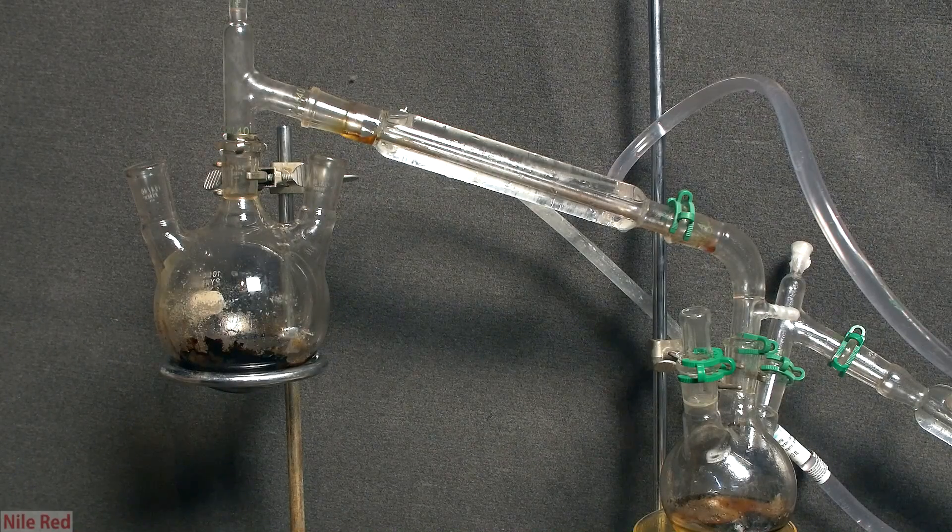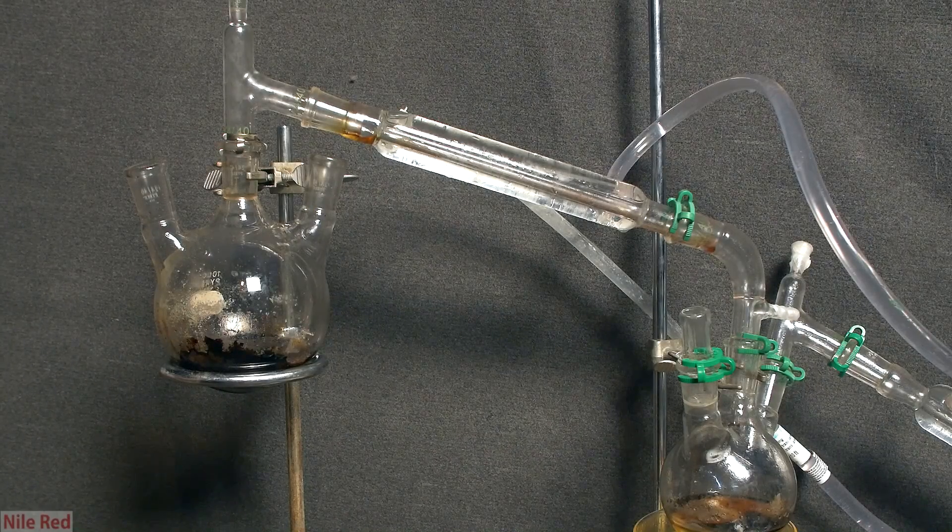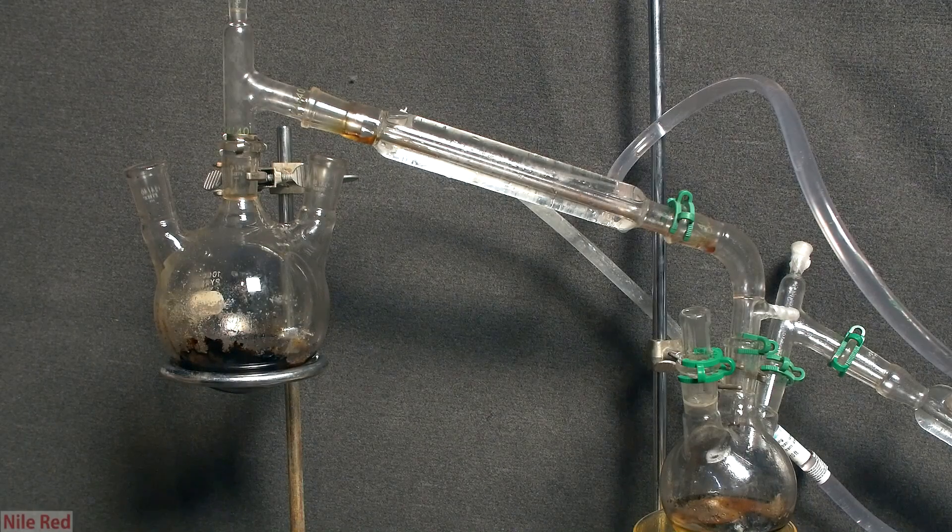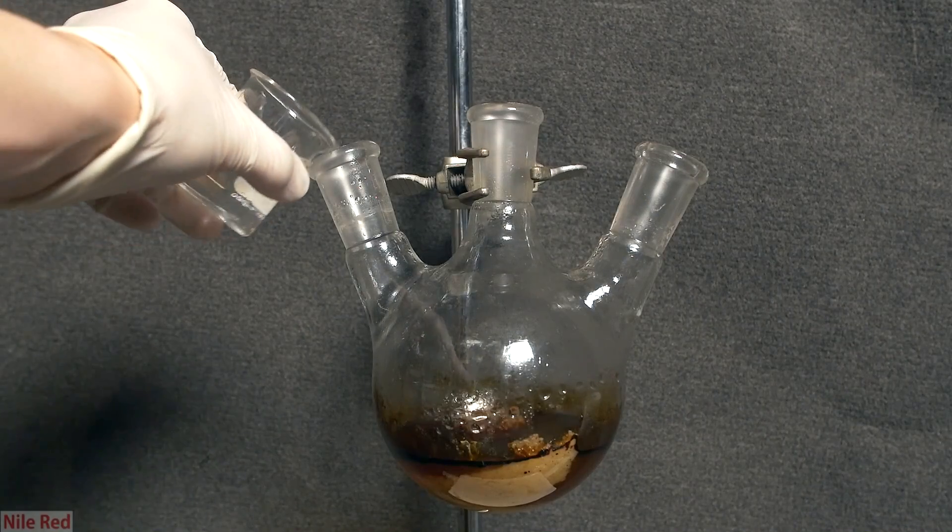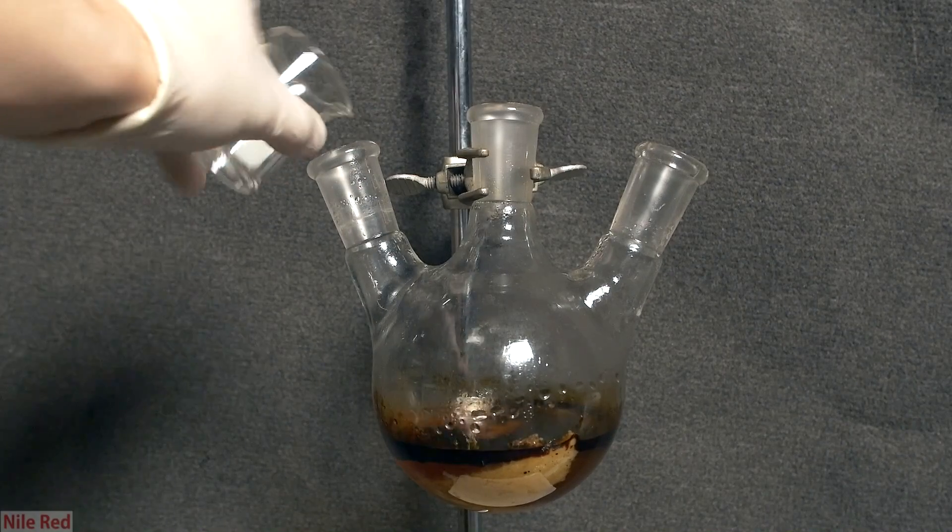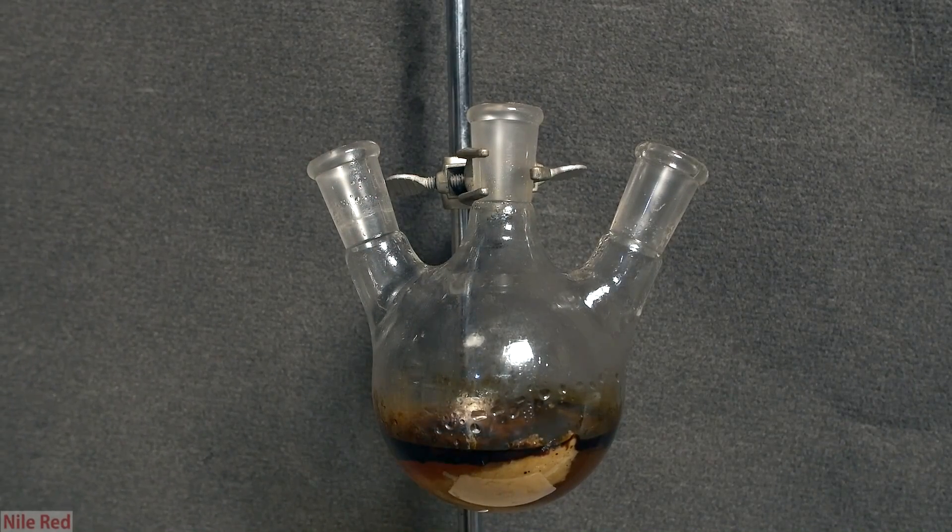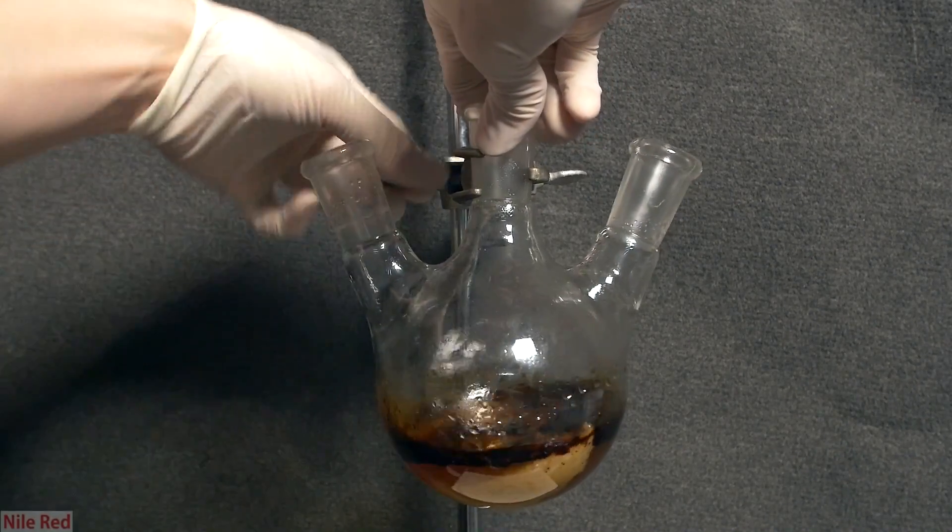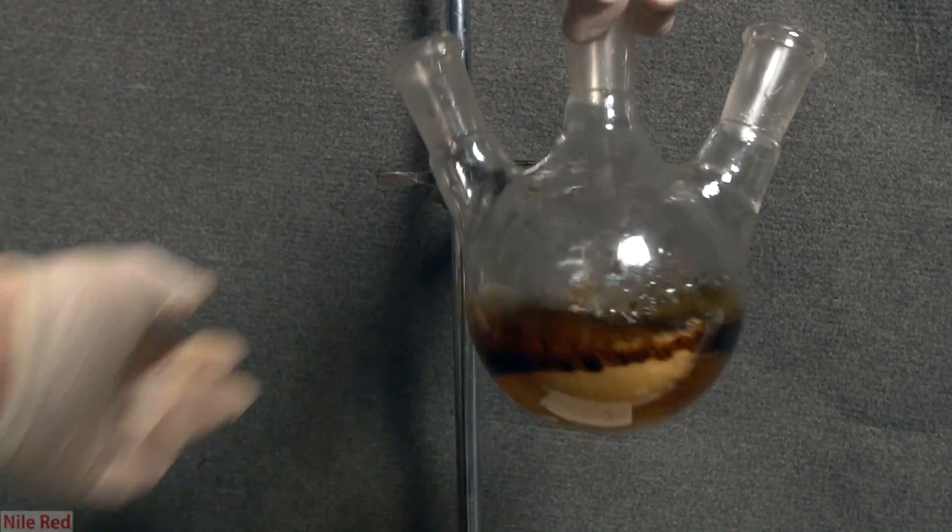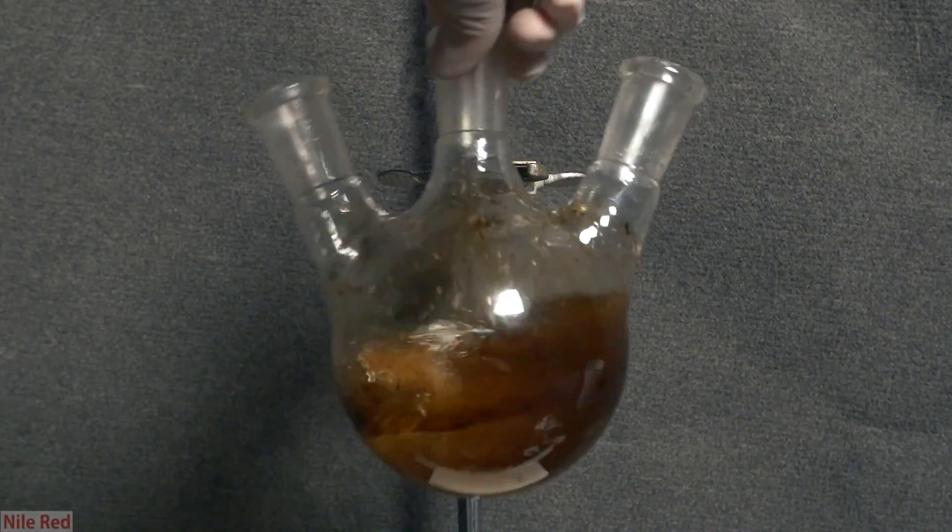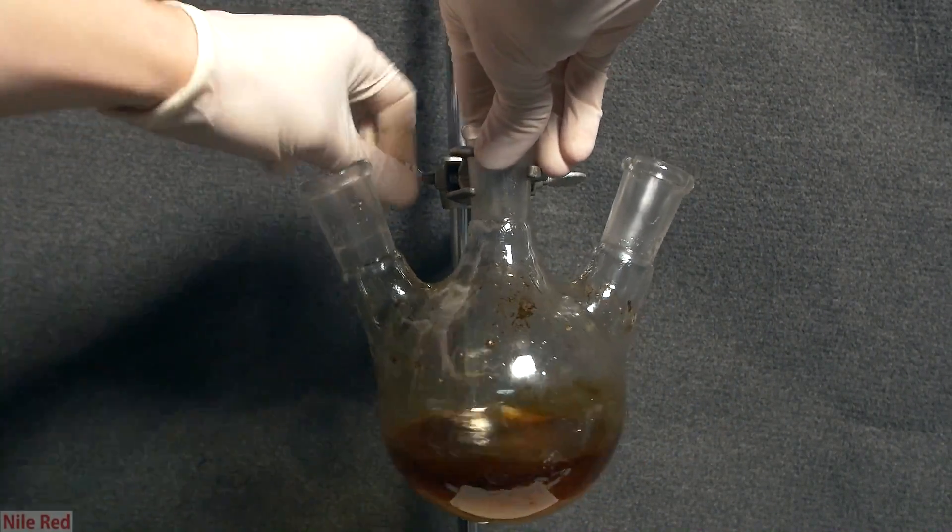In the first part, when we were actually carrying out the reaction, we were left with a hard crusty mess at the bottom of the flask. I first added a little bit of water to dilute everything, and then I added a little bit of sodium hydroxide solution to destroy any acrolein that might remain. I followed this up with several warm water washings, but in the end I was still left with a hard black residue at the bottom.